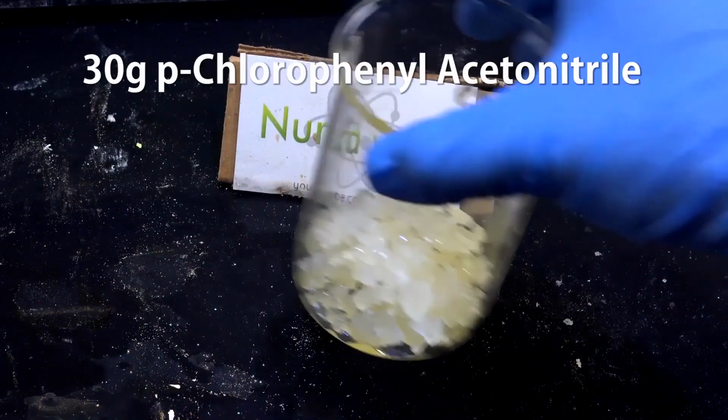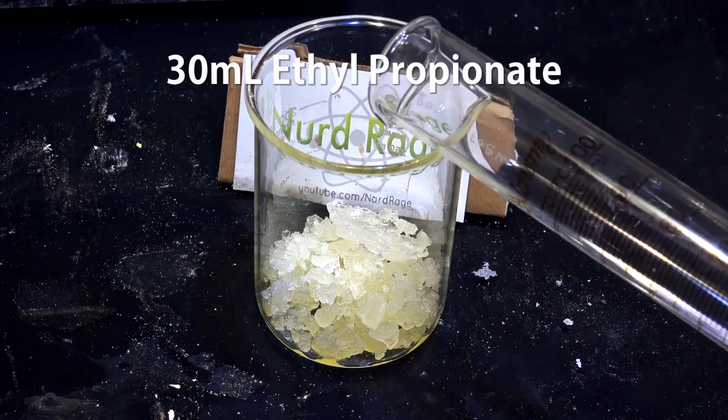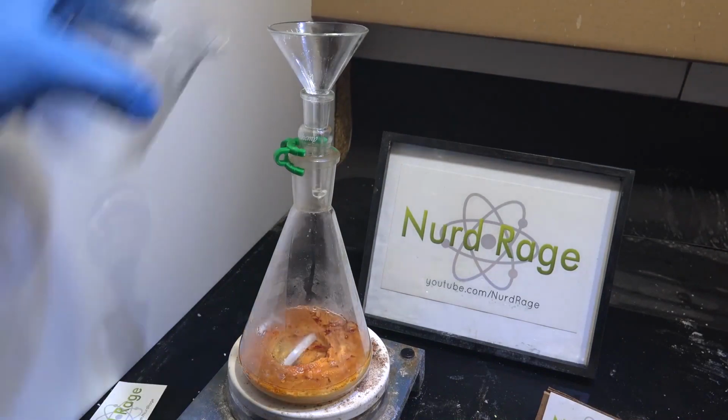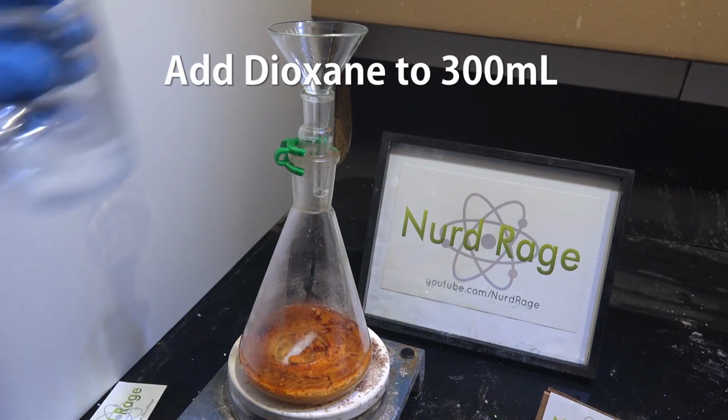Get 30 grams of para-chlorophenyl acetonitrile, then add in 30 milliliters of ethyl propionate. Shake it up until everything is dissolved. Now with the cooled sodium methoxide, add the reagents. Now add enough dioxane so the total volume is about 300 milliliters.